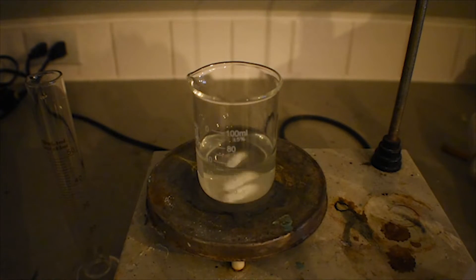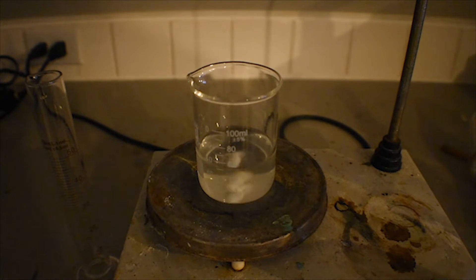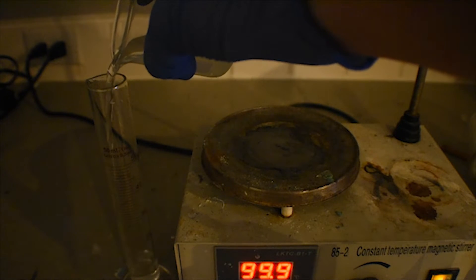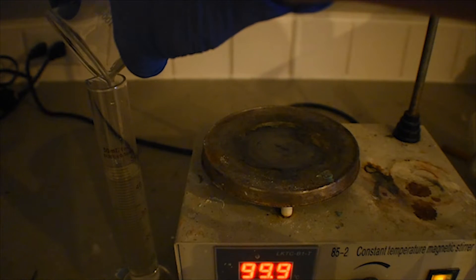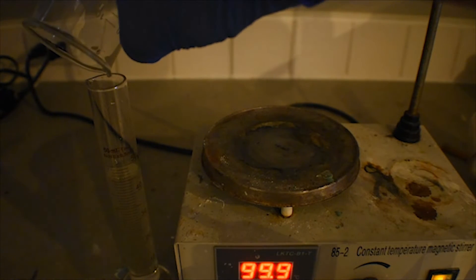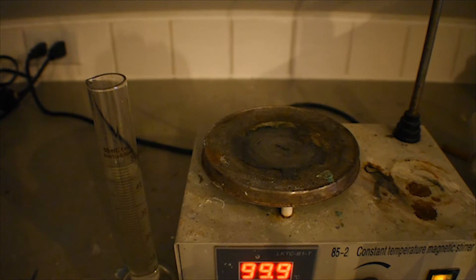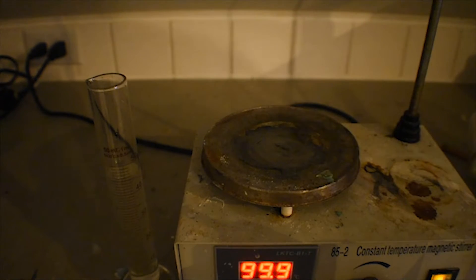Sorry about the lighting — I preemptively moved my lighting outside before I realized I still needed to film this. I'm going to secure the stir bar and add this to the graduated cylinder. It looks like it's a little bit under 50 milliliters, so it looks like my beaker's markings are a little bit inaccurate — good to know.